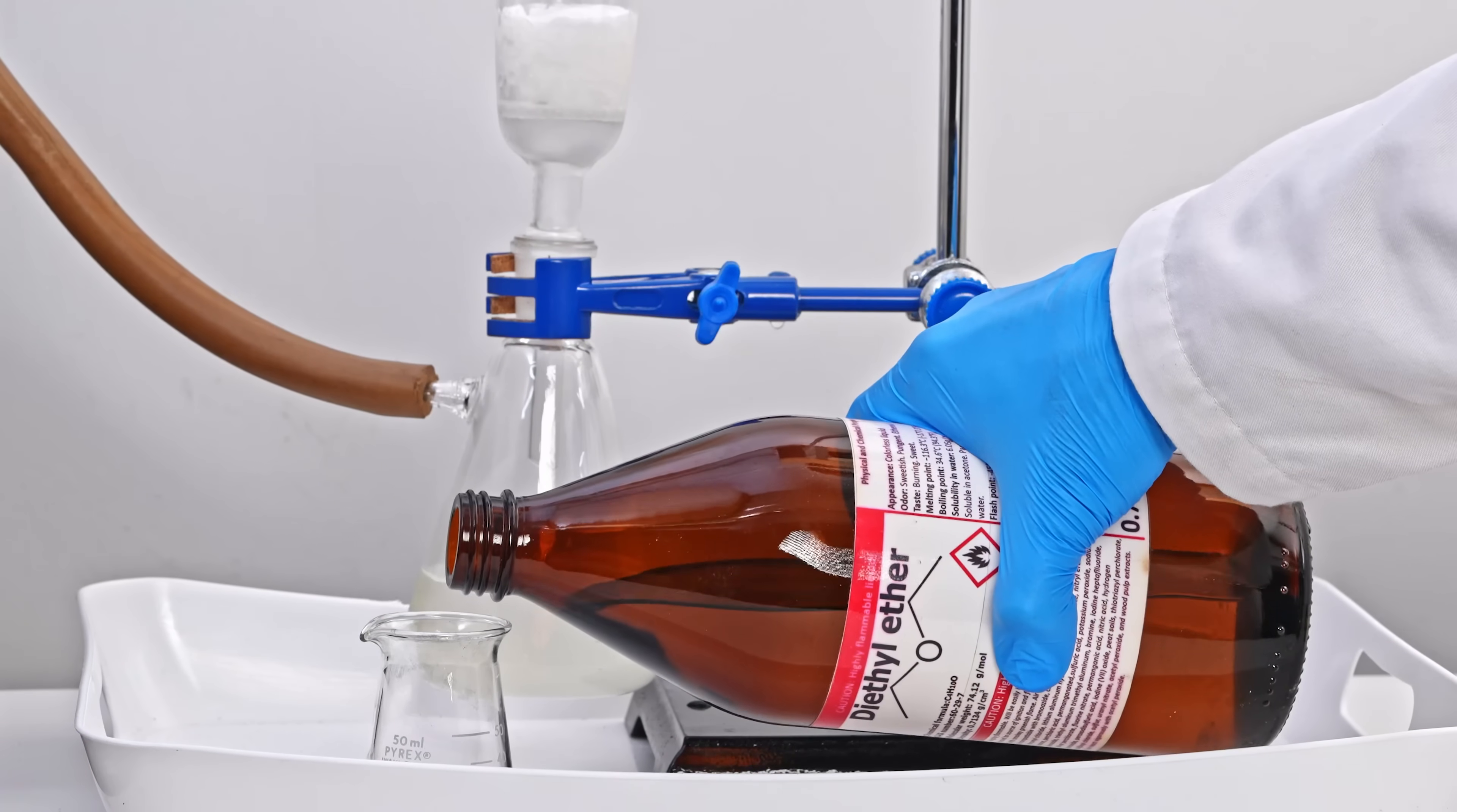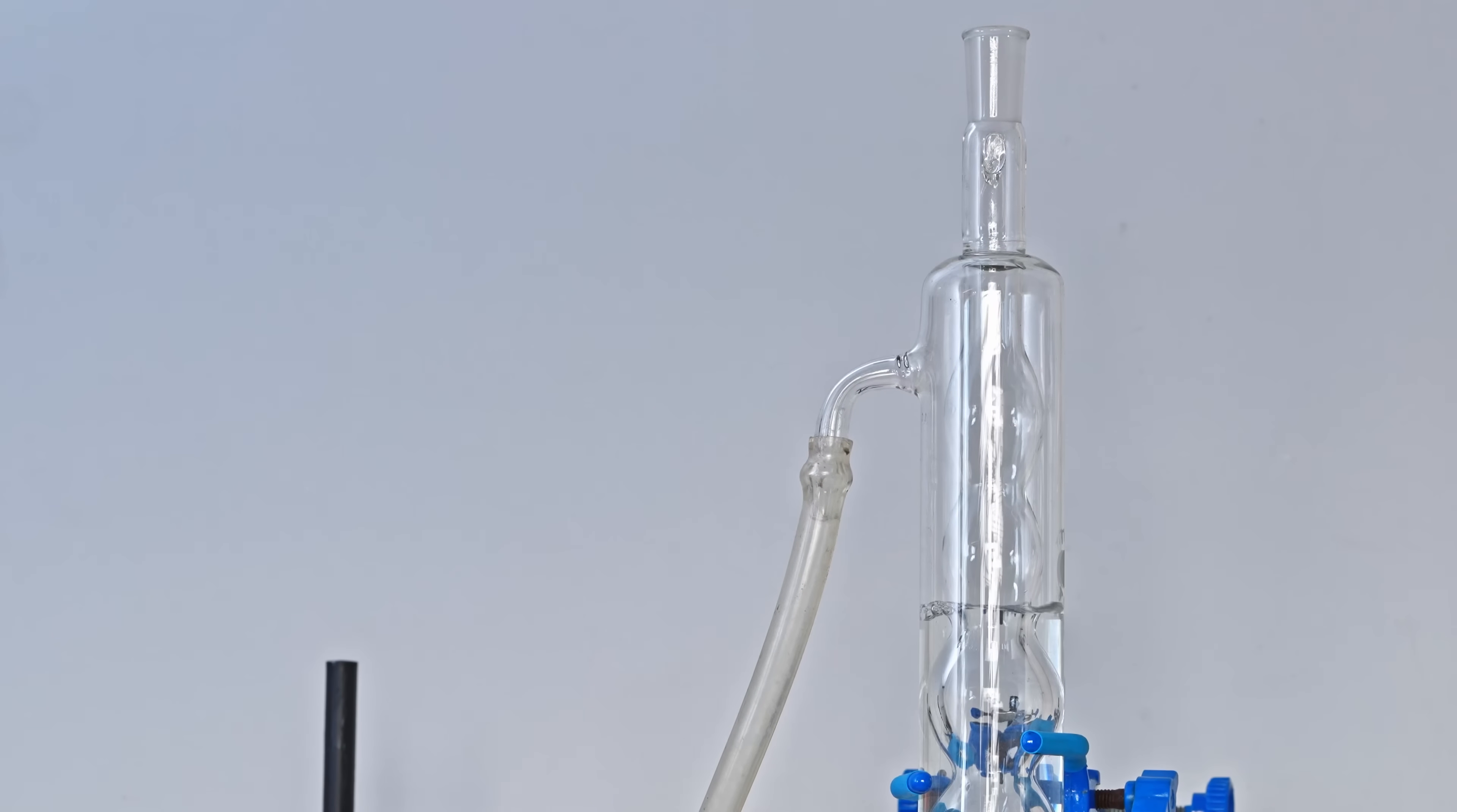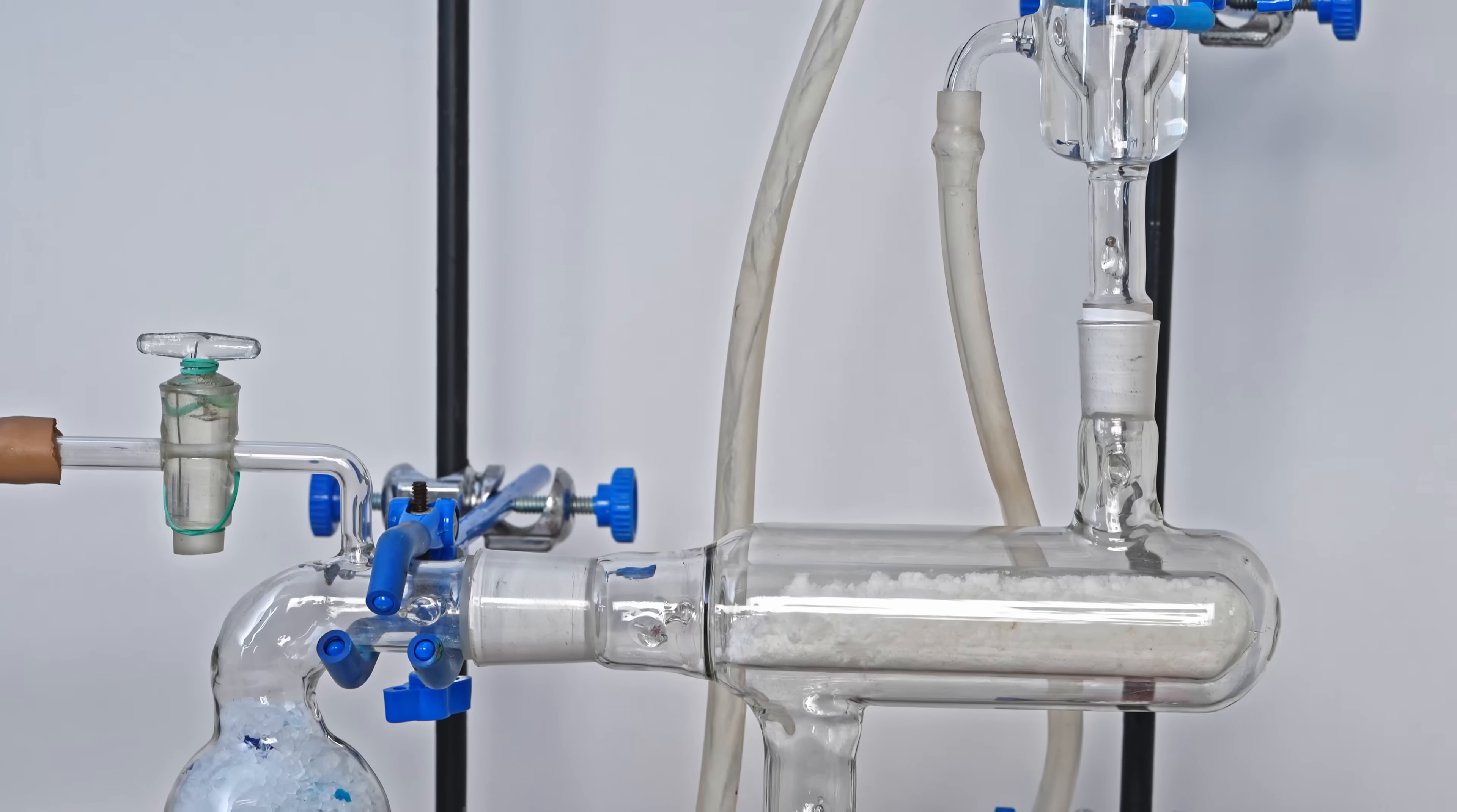After that, it's necessary to dry it in a vacuum. To dry potassium cyanide, I use an Abderhalden drying pistol. This is a laboratory device for drying substances in a vacuum. Its peculiarity is that this device allows you to most completely dry solids from the solvent, including the crystallization-bound one, which in most cases is not removed when drying substances in air or in a vacuum desiccator.